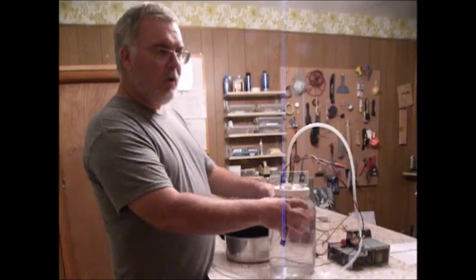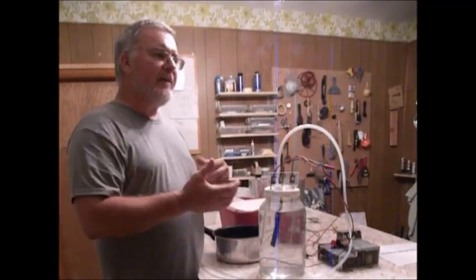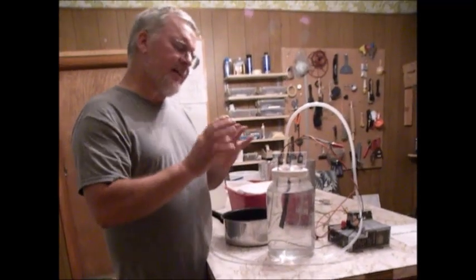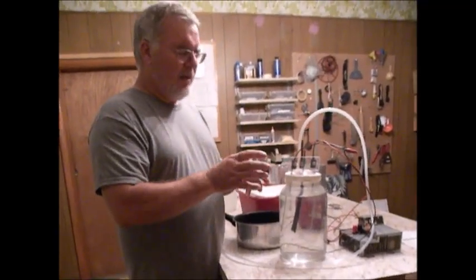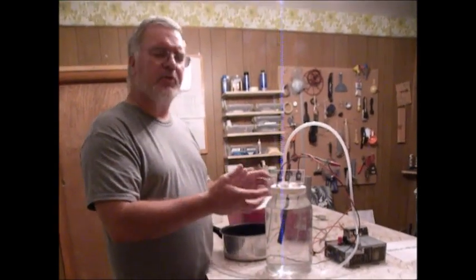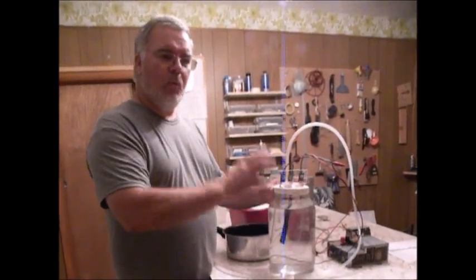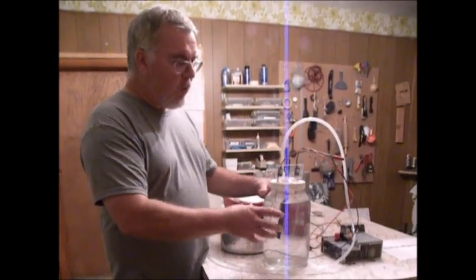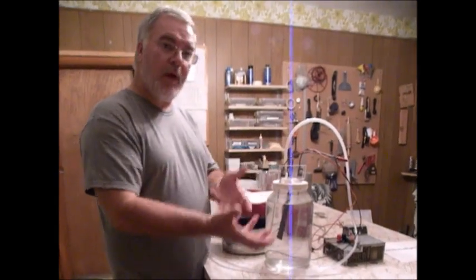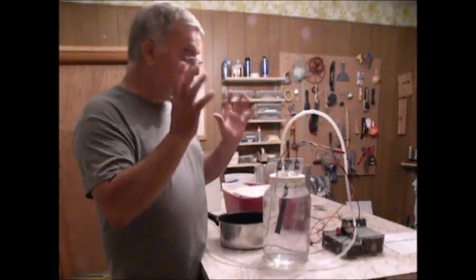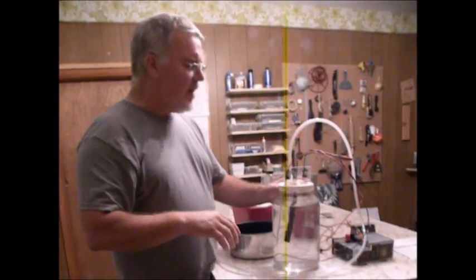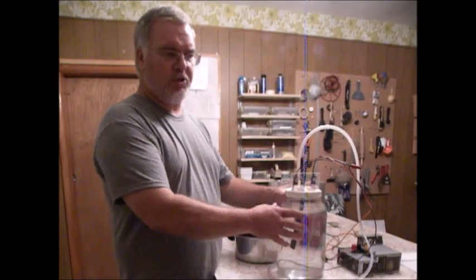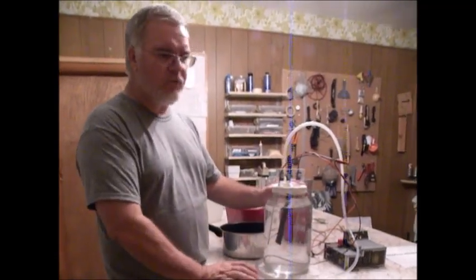Obviously we're producing potassium chlorate, so we're using up our chloride, so we have to replenish it. I believe the mole ratio - and again, this is something you may want to double check - but I think it's about 64 to 66 percent to one unit of potassium chloride. So what I would do is when I harvested, I'd let it dry, I'd weigh what that was, and then I'd take it times 65 percent. That was good, but it's actually a little overkill because I was getting too much salt concentration in, so I backed it off to about 50 percent.